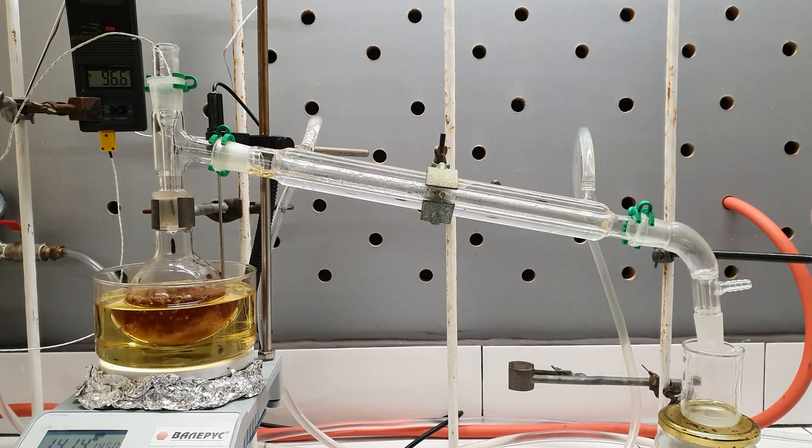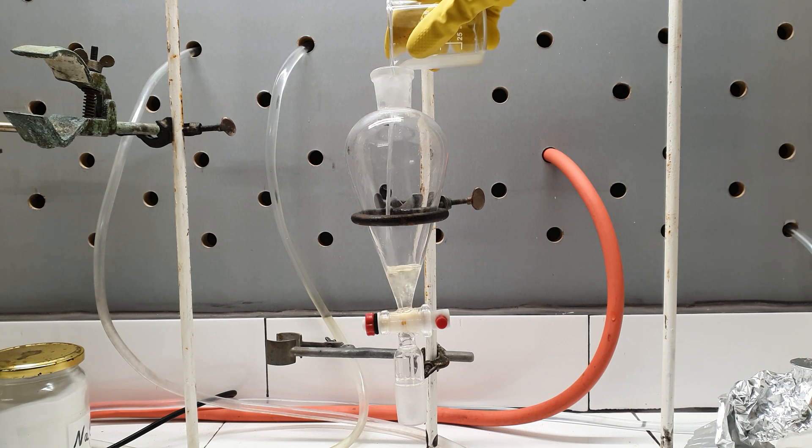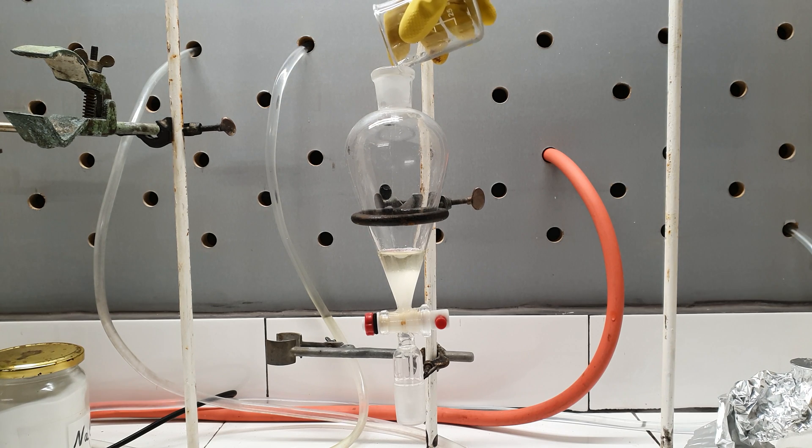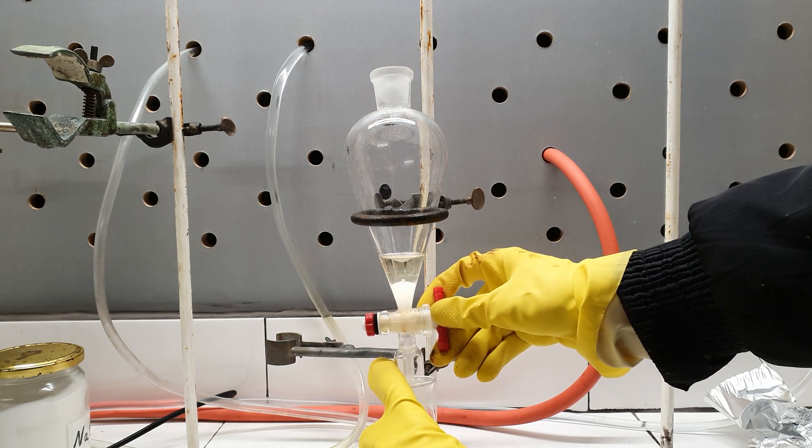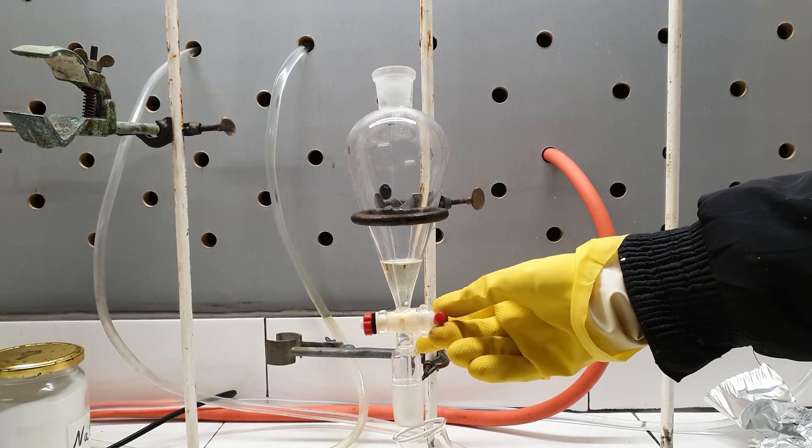When no more nitromethane came off, I stopped the distillation and transferred the distillate in my separatory funnel. The lower nitromethane layer was drained and the upper water layer was discarded.